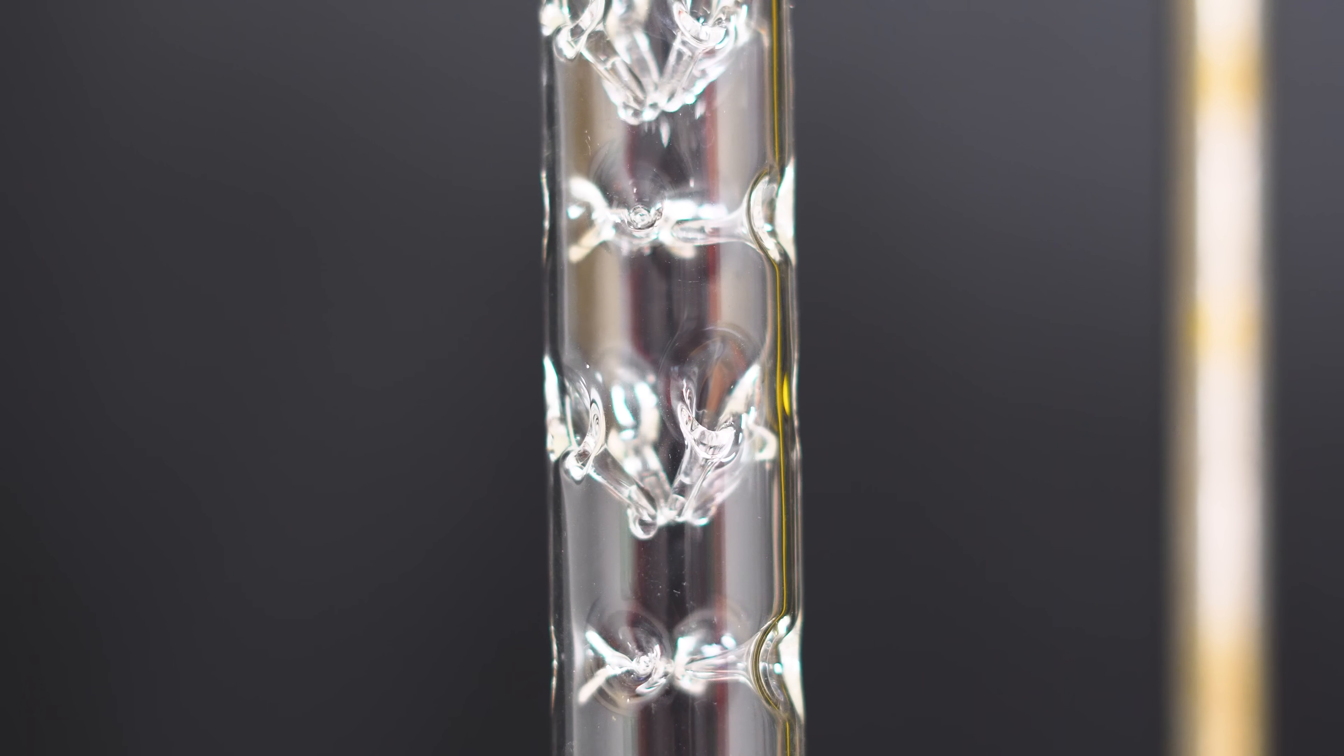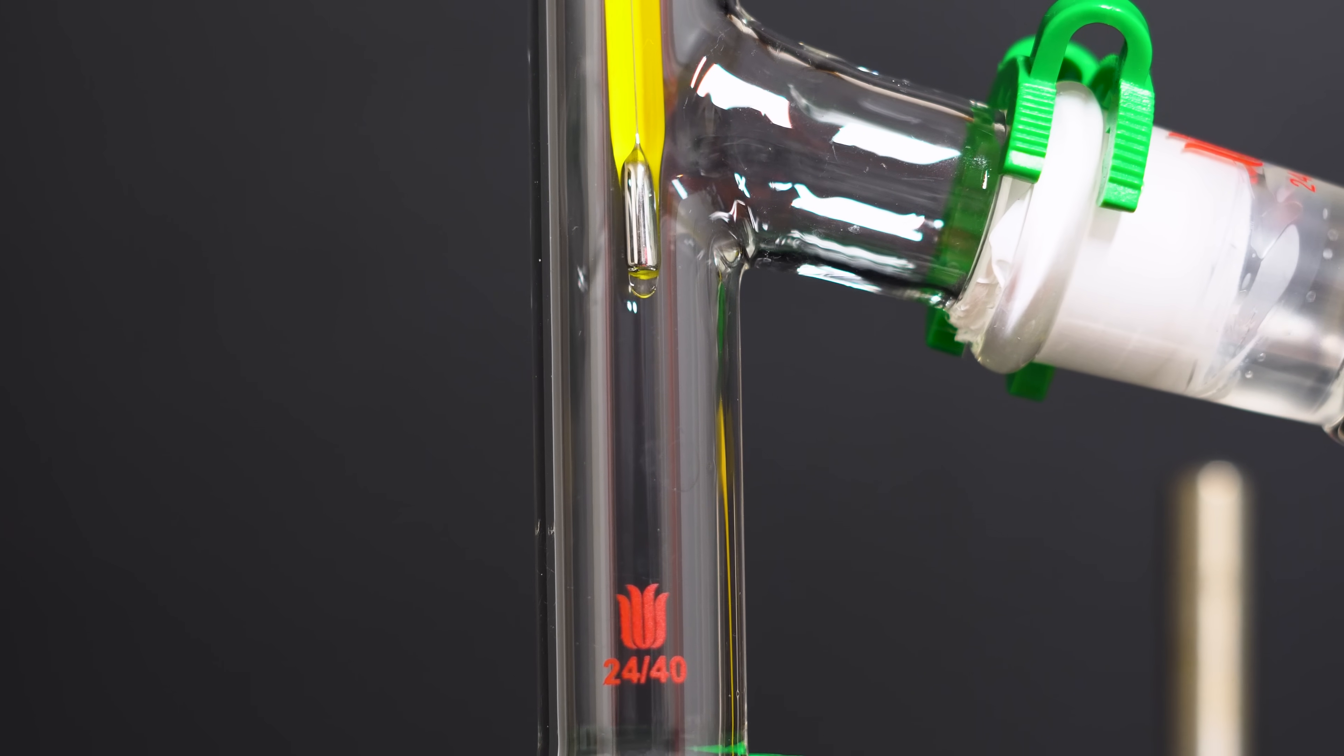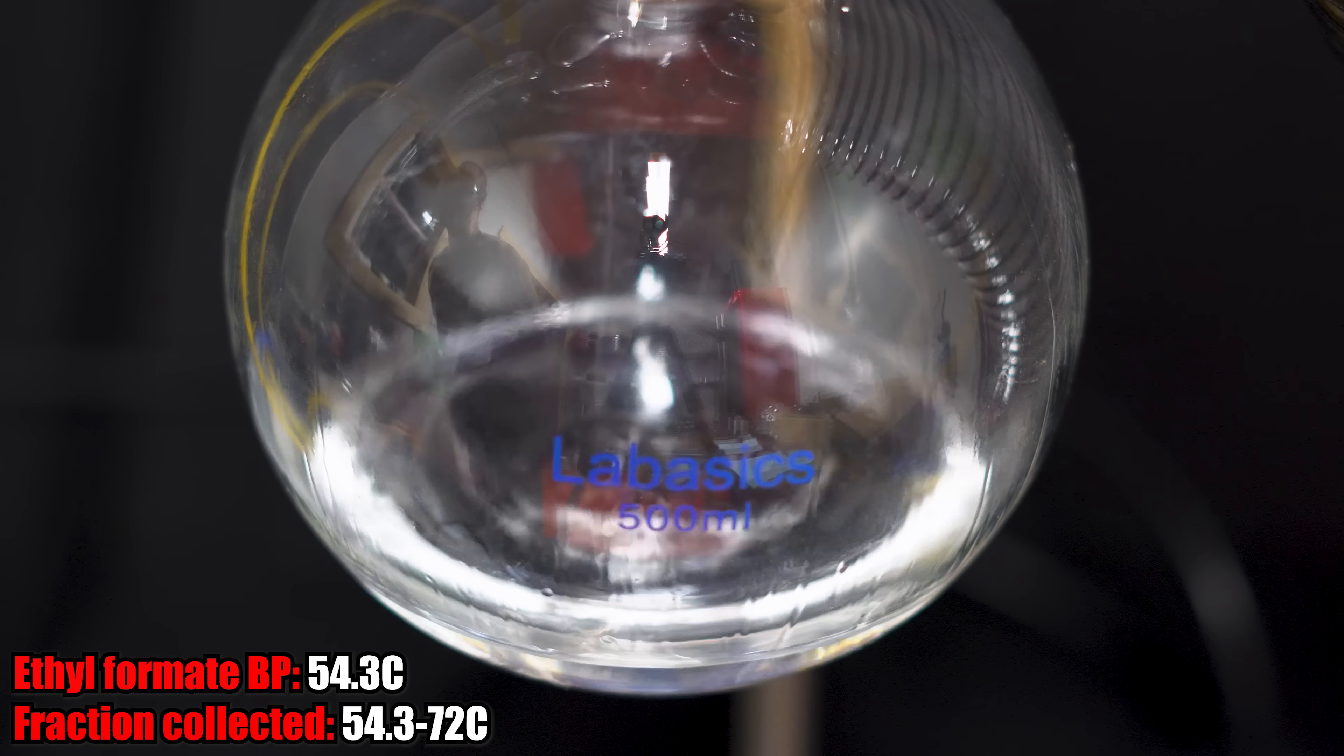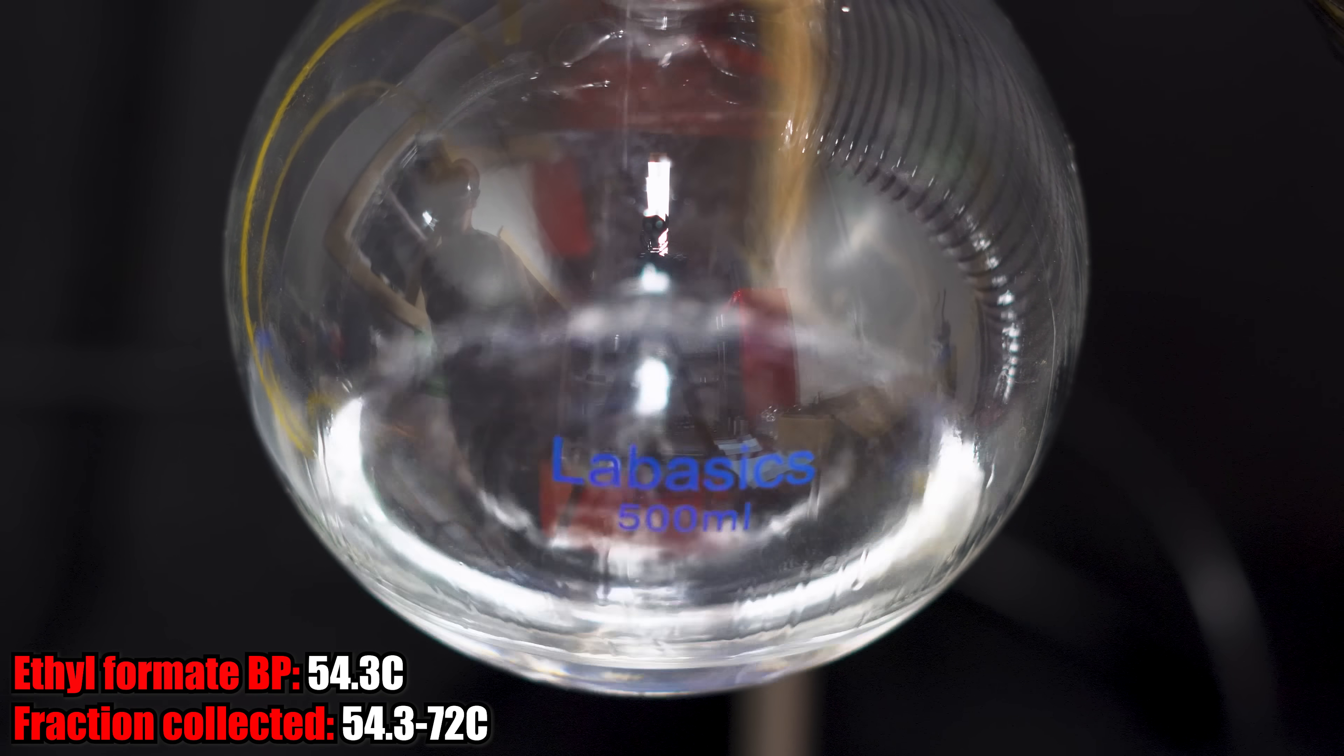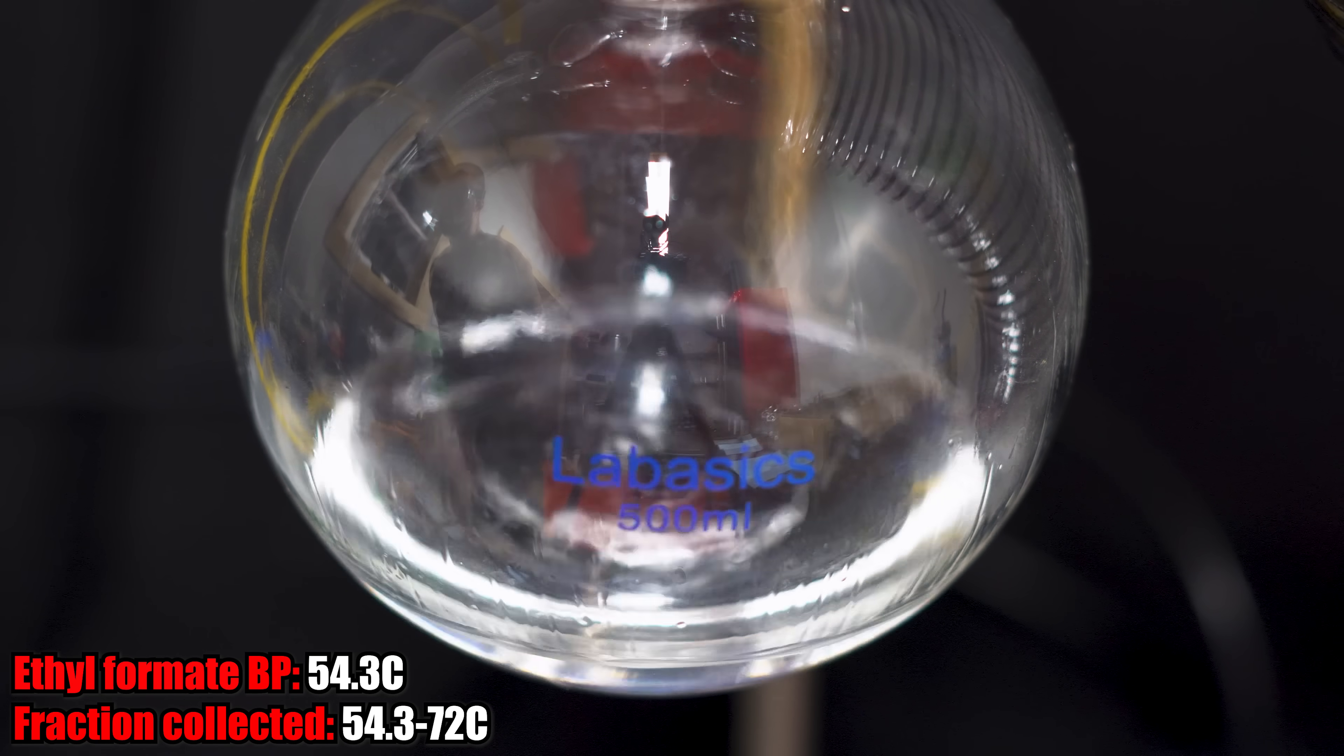Ethyl formate should be coming over first, at a boiling point of 54.3 degrees Celsius. The extra surface area in a fractional distillation column significantly enhances the separation process, leading to more efficient, effective, and pure separation of the components in our solution. The ethyl formate did start coming over at its boiling point, but then the temperature kind of rose to 62-ish degrees Celsius and stayed there for a little bit.